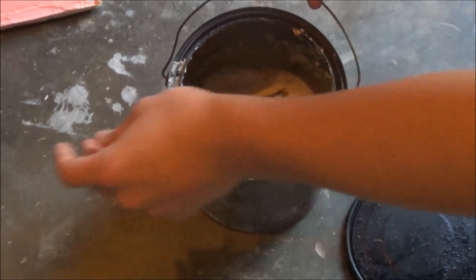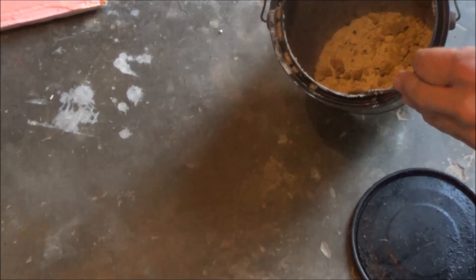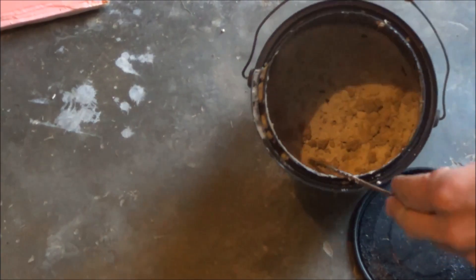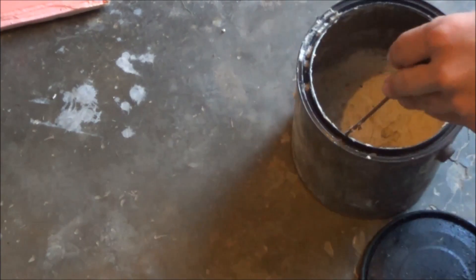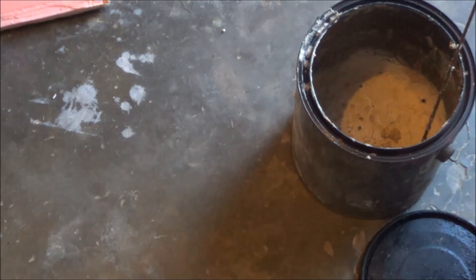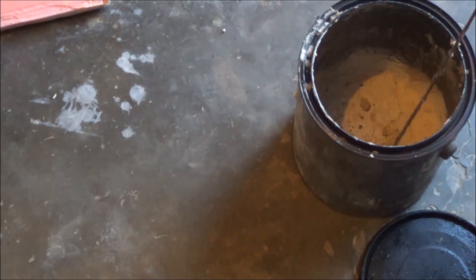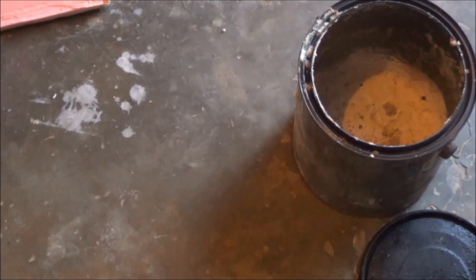Alright, so this is done. You can see down the bottom there, it turned out quite white, which is quite nice. You can see a bit of fully decomposed melt on the top there, that brown layer. I just lost power. Oh, it's back. Alright then. So that is it for this episode.